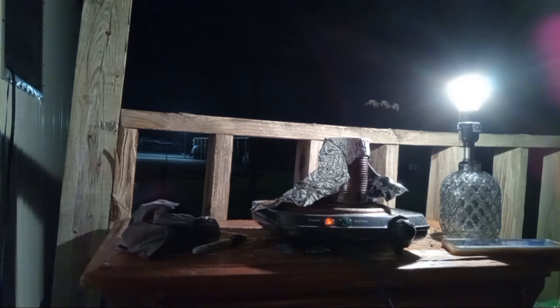It does melt as it's heating, and it does foam a bit, which is why I put the silica gel in, like I mentioned. Break up the bubbles. That doesn't interfere with the reaction, and it won't interfere at any step along the way. But you can also remove it if you really want. But I ran everything through a blender to make sure it was well combined. So yeah, that's not coming out. All right, be back in a bit.